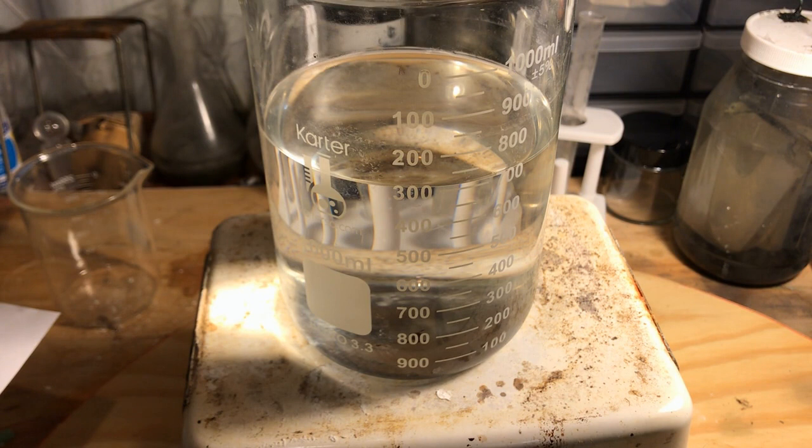The concentrated sulfuric acid I used is not 98% — it is something around 91 or 92%, which is what I got after doing a titration. But for my purposes it's really negligible, because the yield turns out well in this reaction regardless. It's a very simple procedure and the reaction runs smoothly nonetheless.